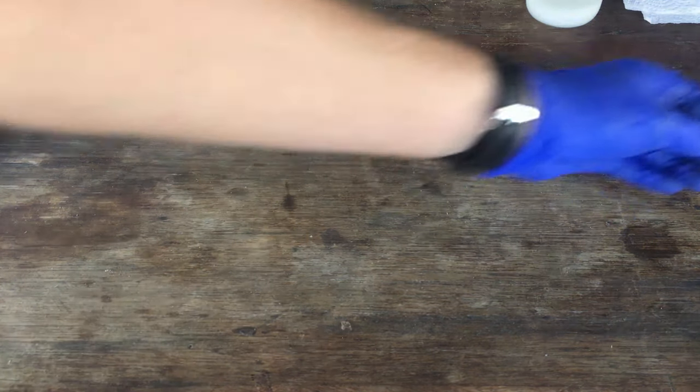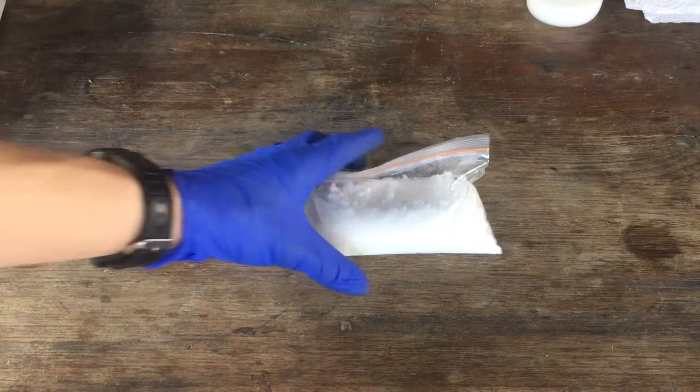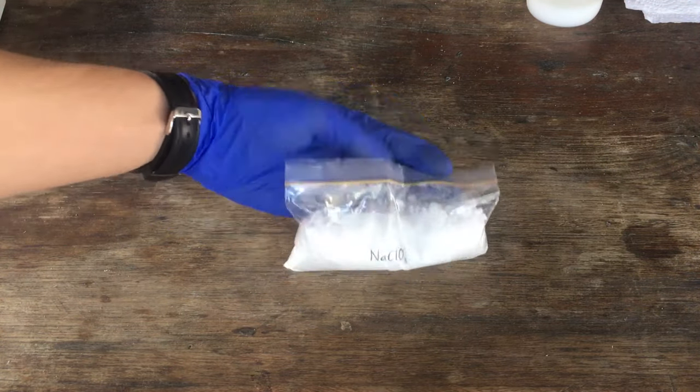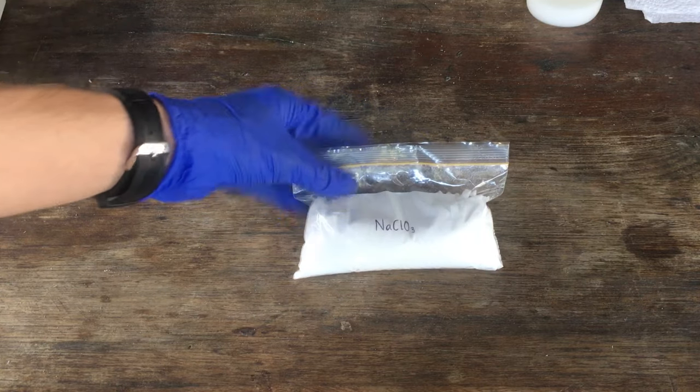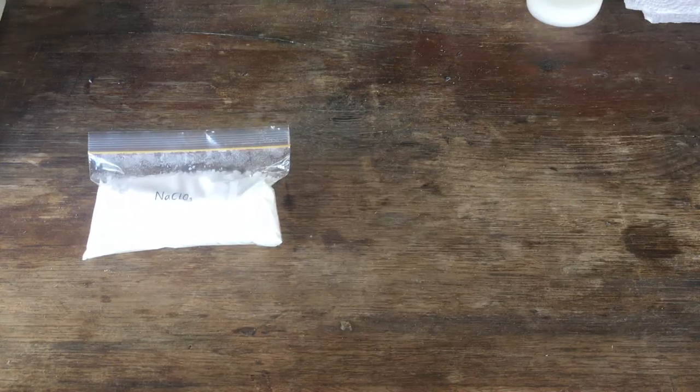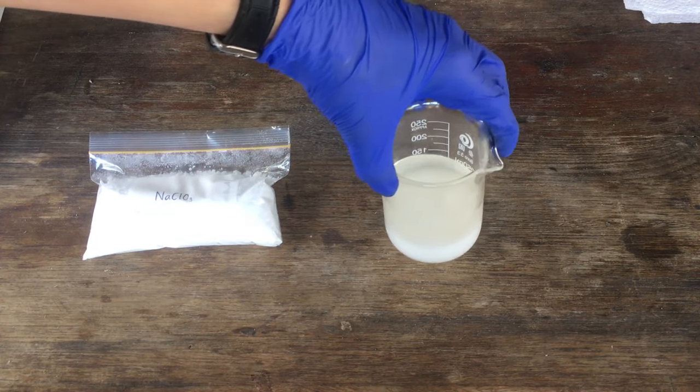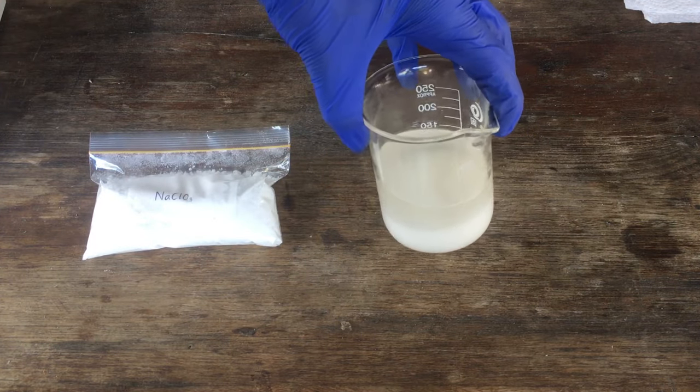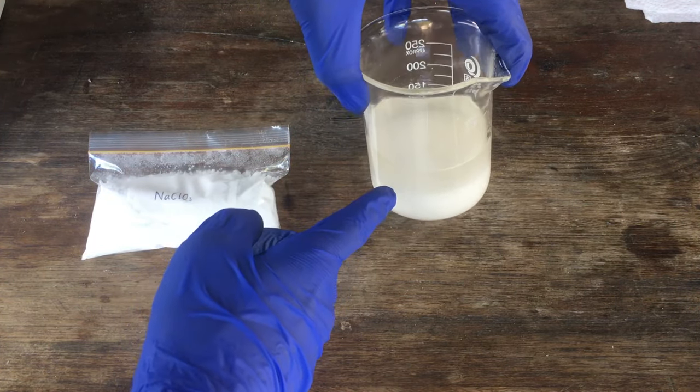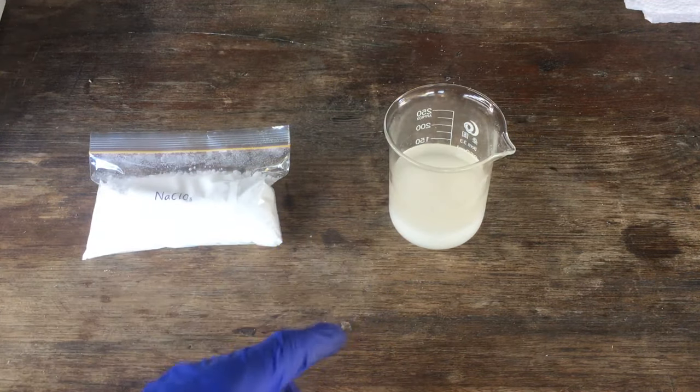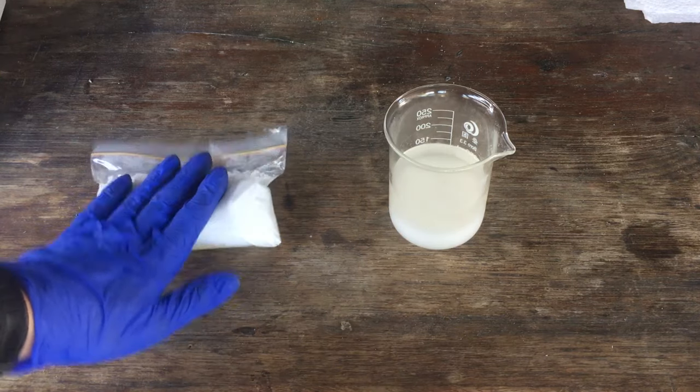After washing and drying our first crop of chlorate crystals, this is what we get. Now this is 245 grams of sodium chlorate that we got out of our first crystallization of our chlorate solution. We do have a bit of leftover solution that we decanted off the top, which I have gone ahead and boiled down a little bit in order to crystallize out some more crystals. And we have possibly another 60 grams in here. So I will go ahead and wash and dry these crystals and add them to our yield.